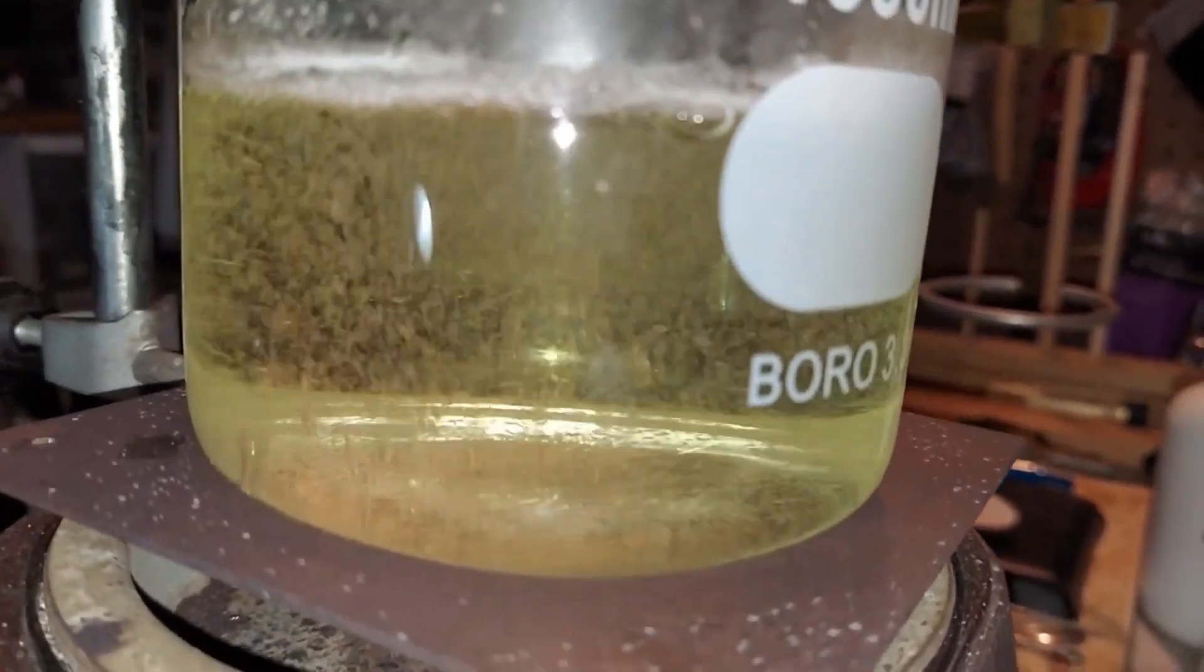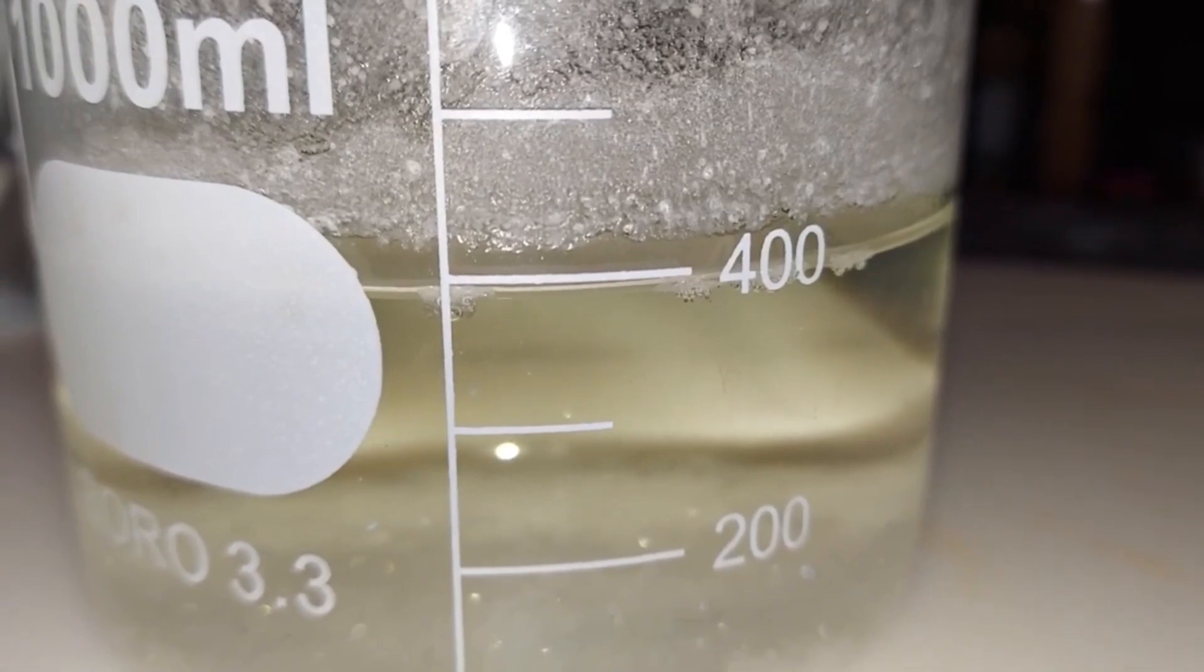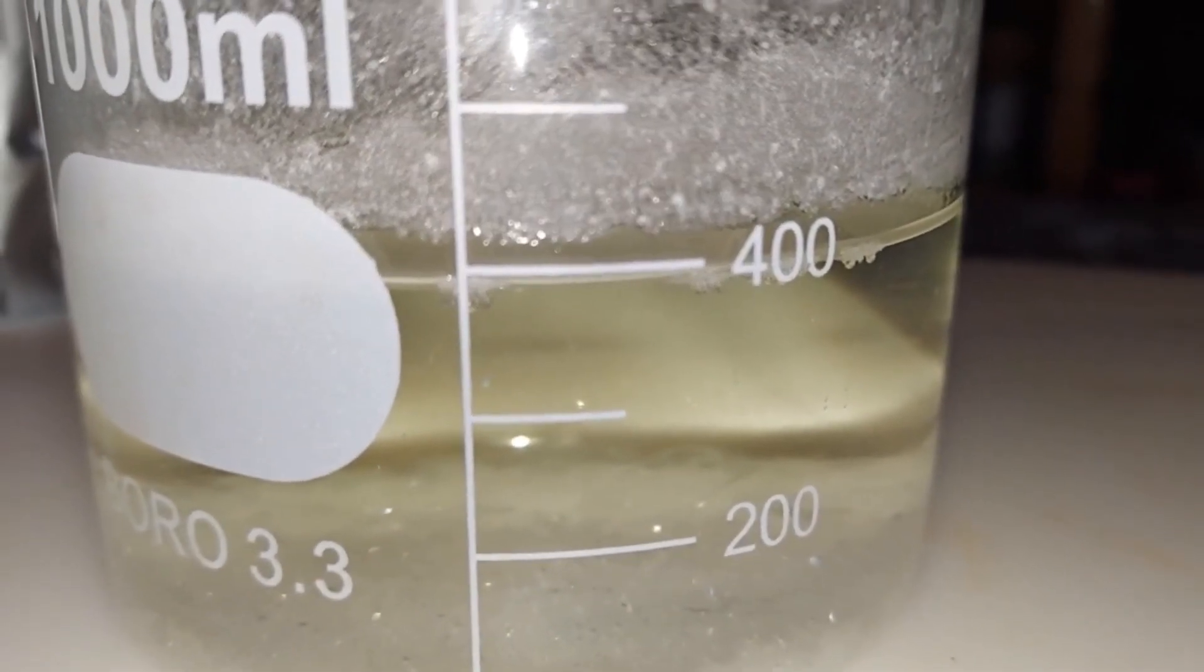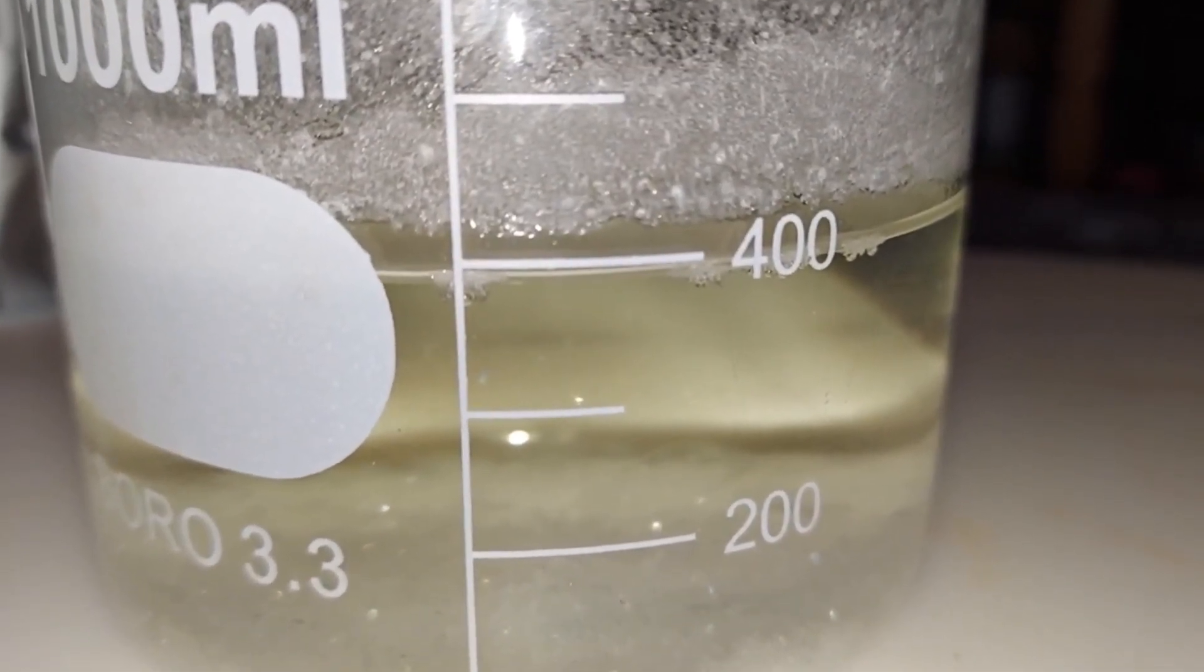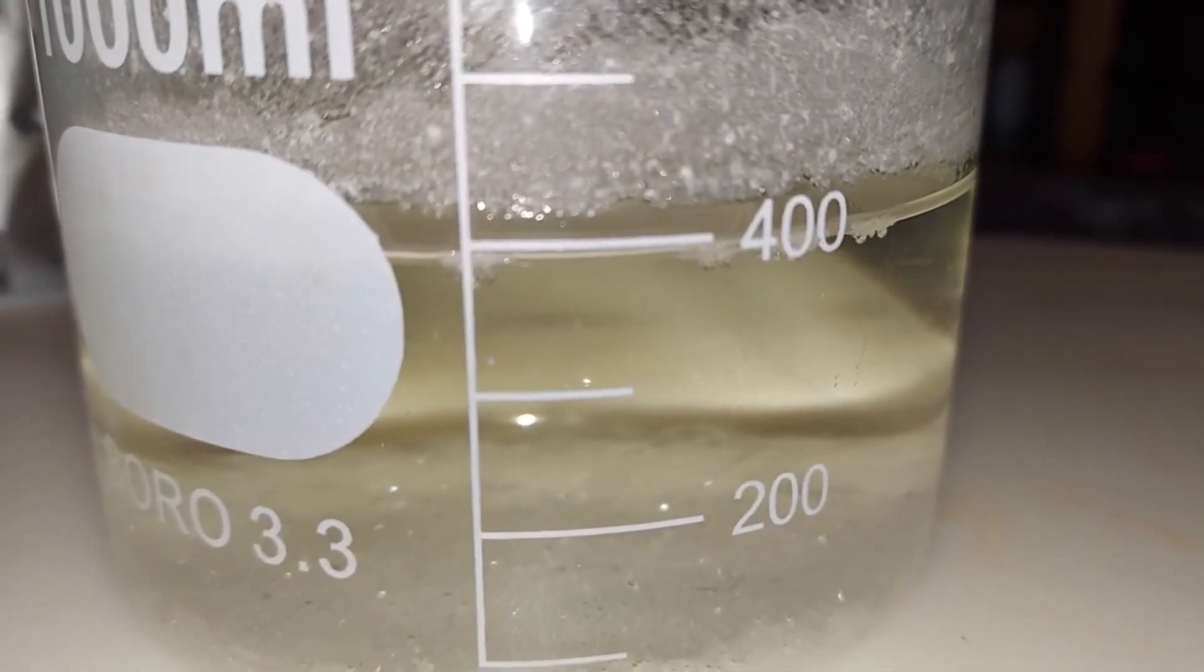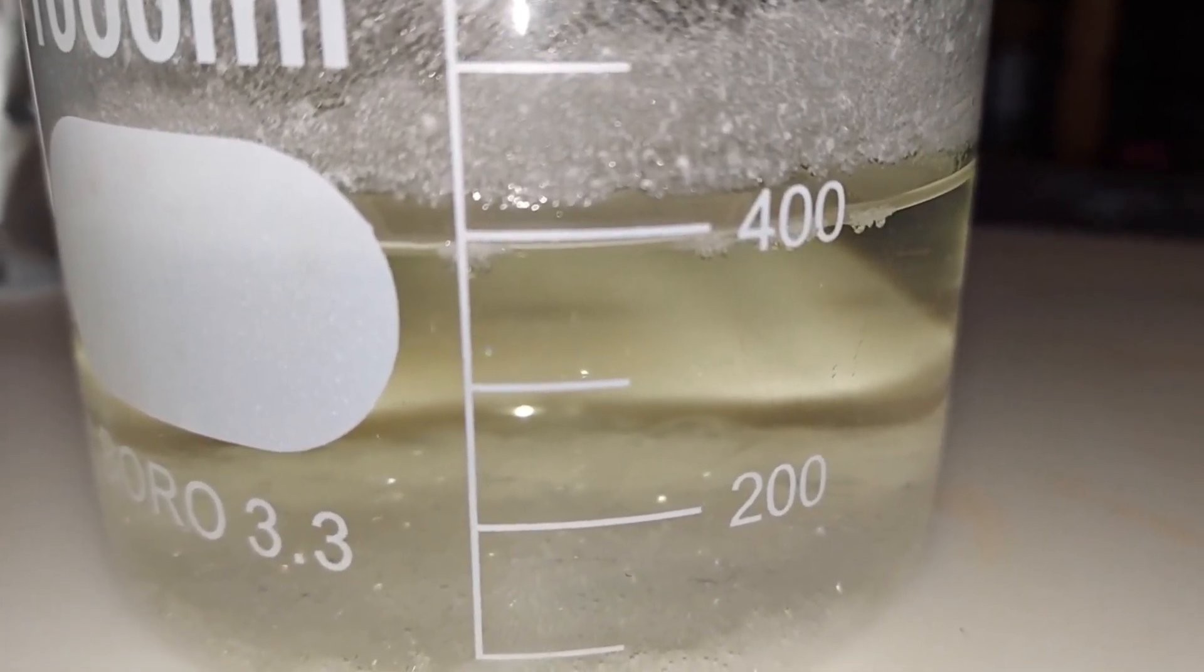The boiled bleach solution cooled down on its own, and because of that I lost maybe another 100 milliliters or so, but that's okay. We got 400 mls here, and that means the solution of KCl or potassium chloride needs to be the same amount.